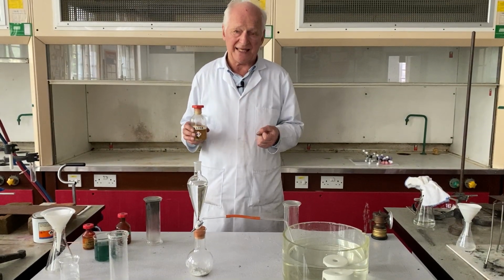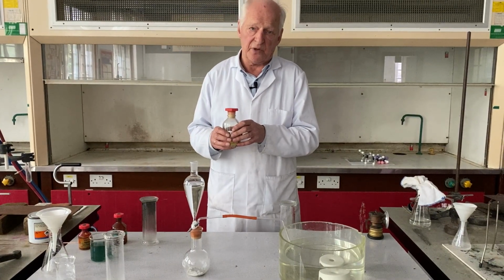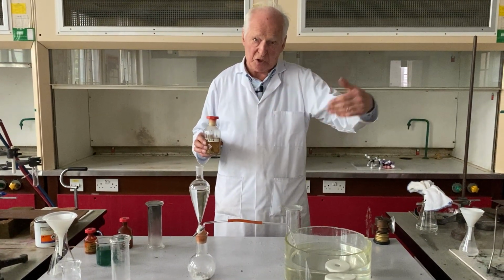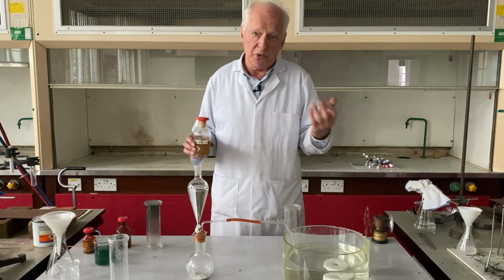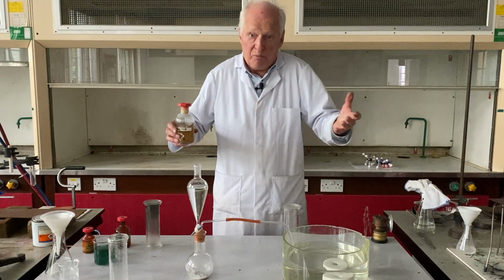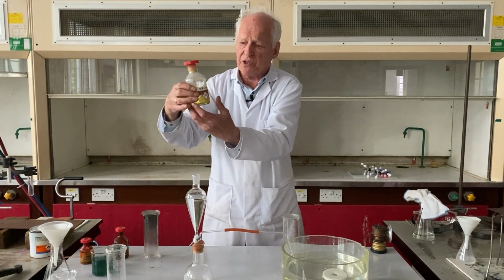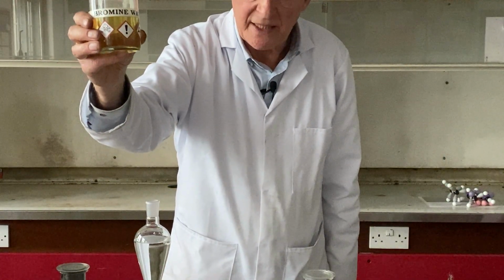Now, you may know that ethene, C2H4, very readily decolorizes bromine water. However, with acetylene, logically speaking, a triple bond should be more reactive than a double bond, and you would expect the reaction to proceed even more rapidly, which is what I thought before I started these experiments. Please watch carefully. Here I have bromine water. This is a very, very dilute solution of bromine in water.